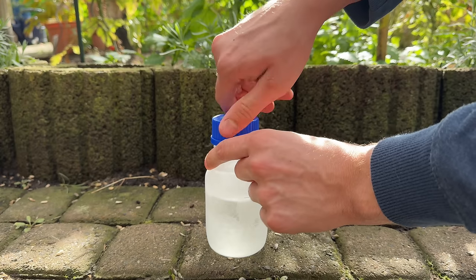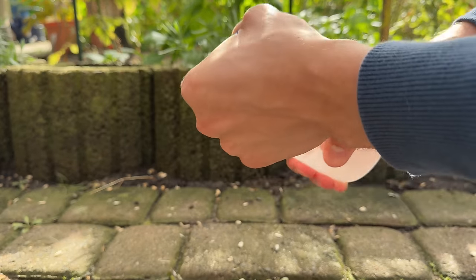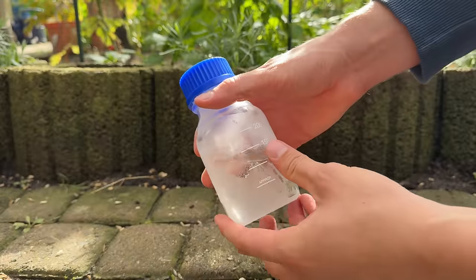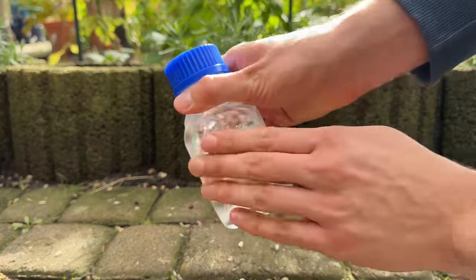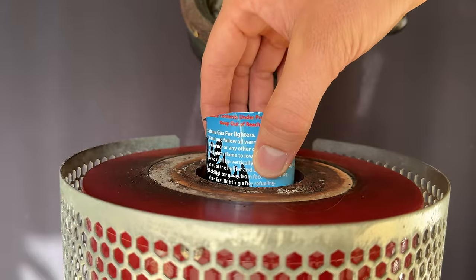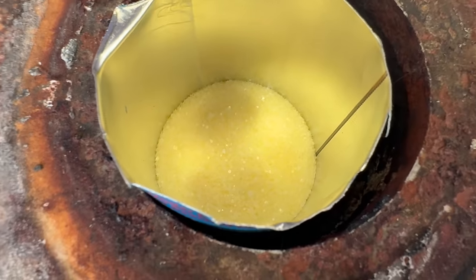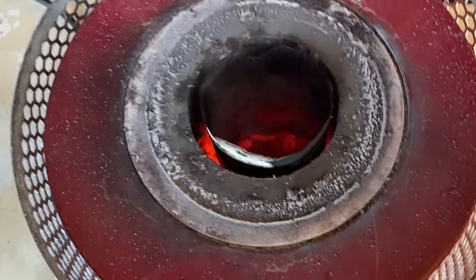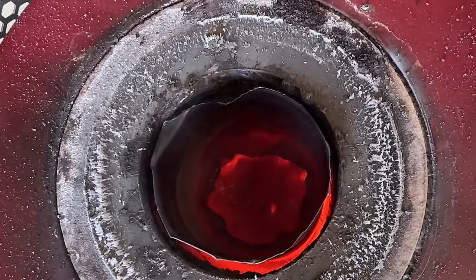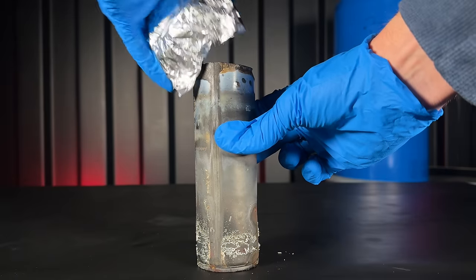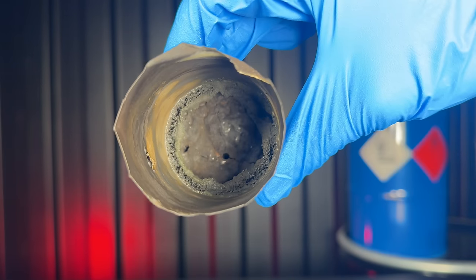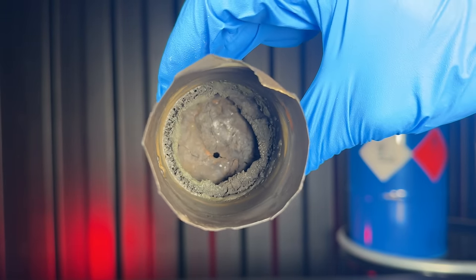As I didn't have an empty gas bottle, I discharged this full one and I'm going to keep the gas. I'm not going to waste it. Please don't explode. Unlike last time, there's a lot of empty space in the container and it should not overflow. I heated it more slowly as well, maxing it out at 900 degrees. It looked really promising.